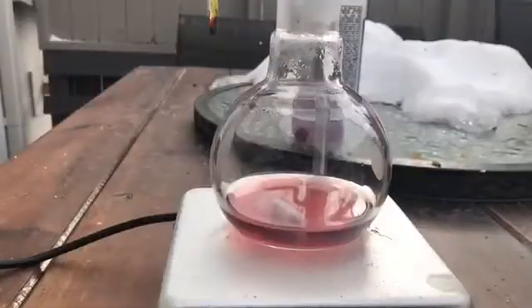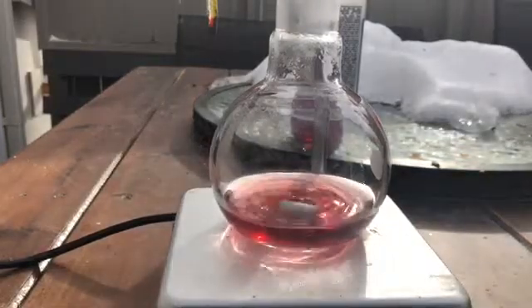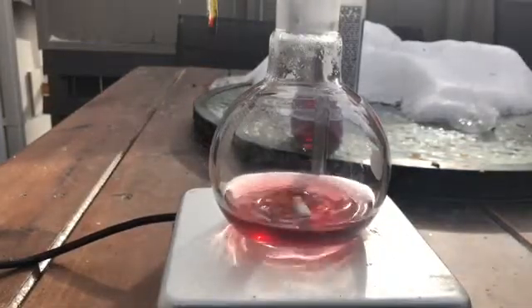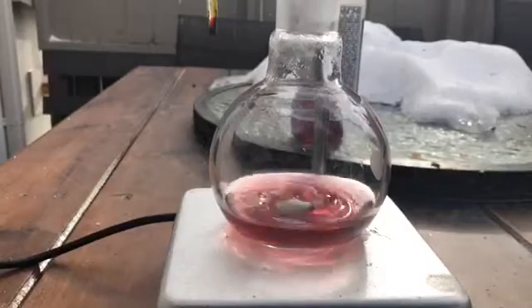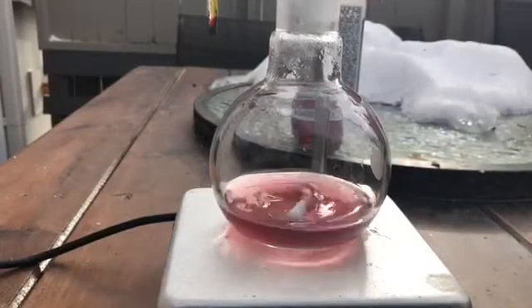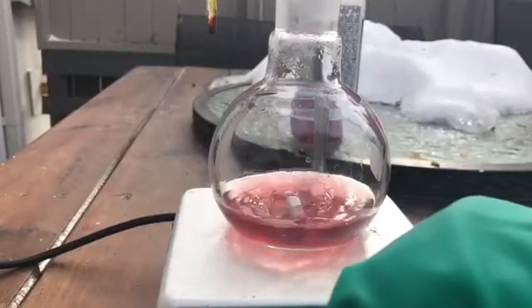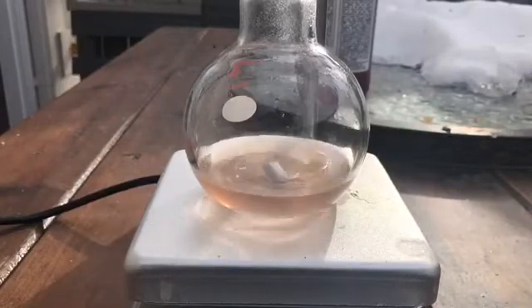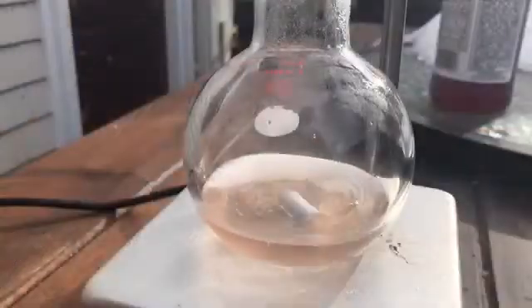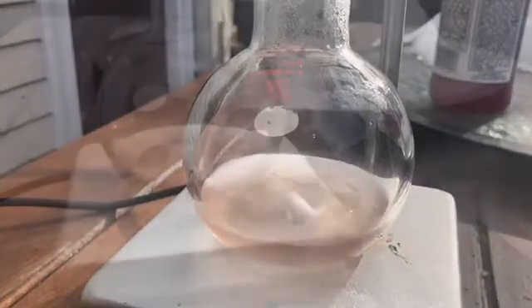Not shown here, we had to adjust the pH to 6.5 just to prepare for the addition of the sodium bicarbonate. Now we can add our sodium bicarbonate into the aminoguanidine solution, and this should neutralize the acid and form the bicarbonate salt of aminoguanidine. Here you can see the color change between the aminoguanidine bicarbonate solution and the really red aminoguanidine solution we saw earlier. This is a really good indicator that it's working, and now we can take it off our hot plate and let it chill for a couple hours to overnight.